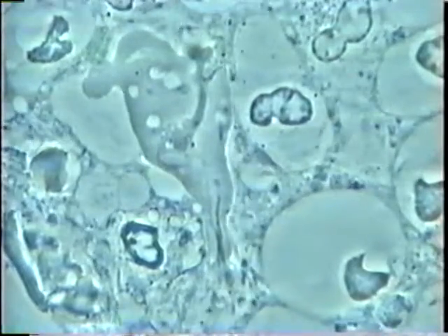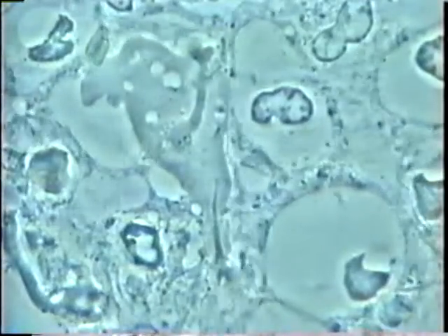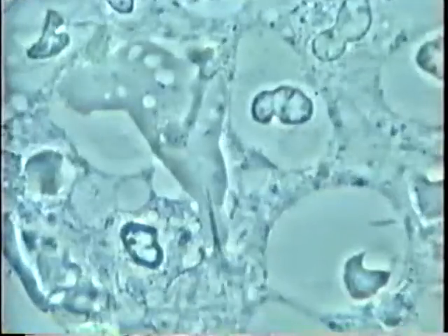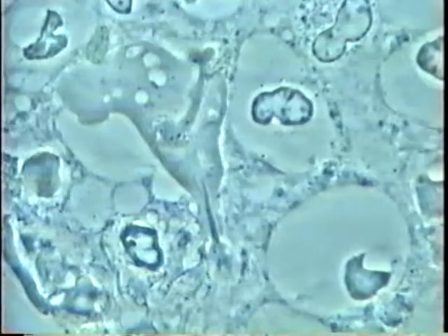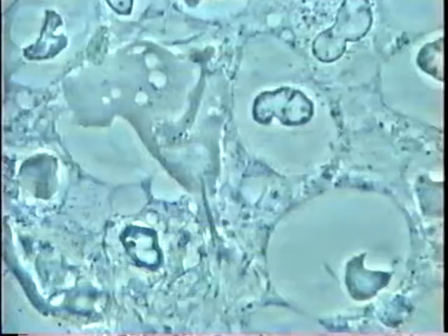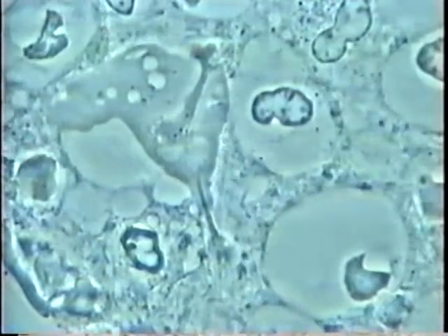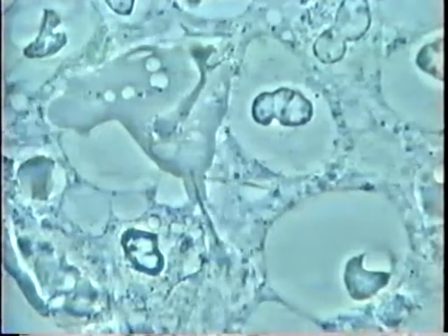If you have this parasite, they feed from your white cells — leukocytes — and release their enzymes into your gum. So don't leave those parasites if you want to be cured of gum disease, because they will always release enzymes from the white cell into your gum. The process here is almost finished at the top, but you can see it also starting a little at the bottom of the parasite — a black line on top and bottom. When the parasite has almost fed from one nucleus, it moves away and starts on one, two, or three more cells around it.